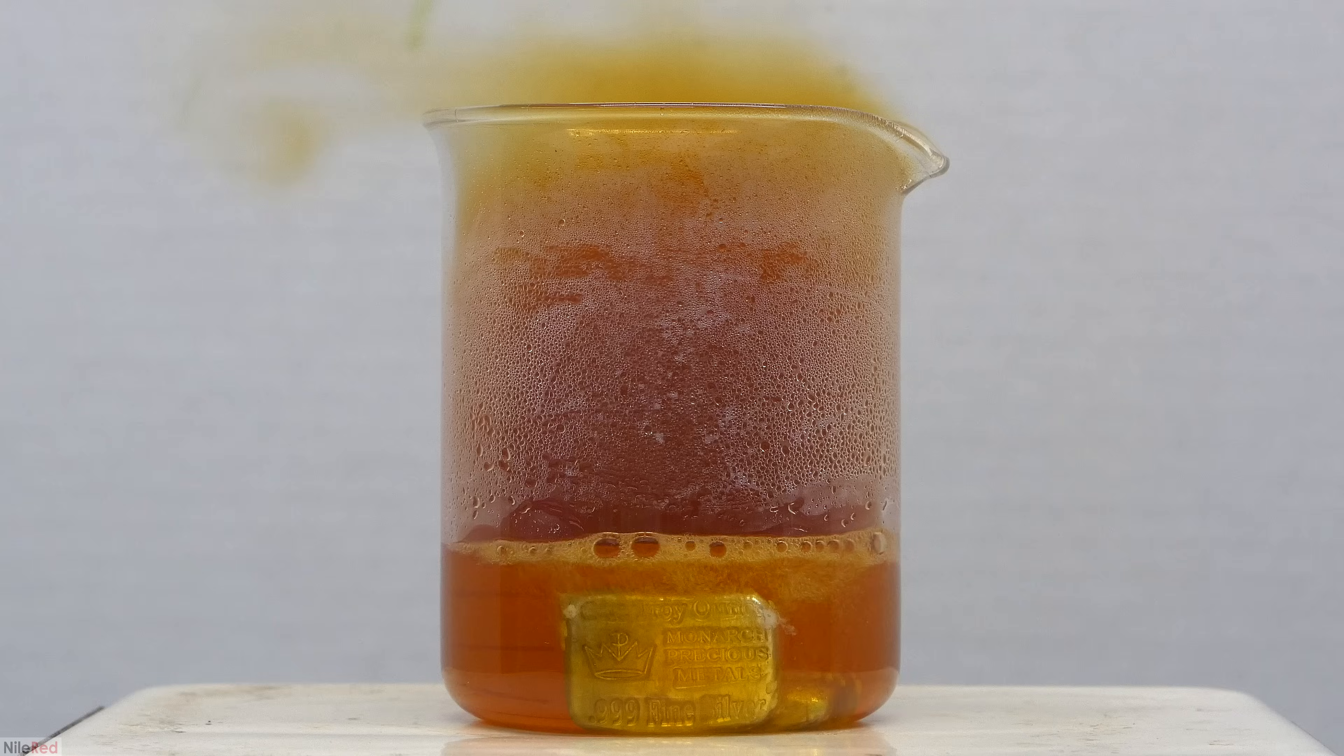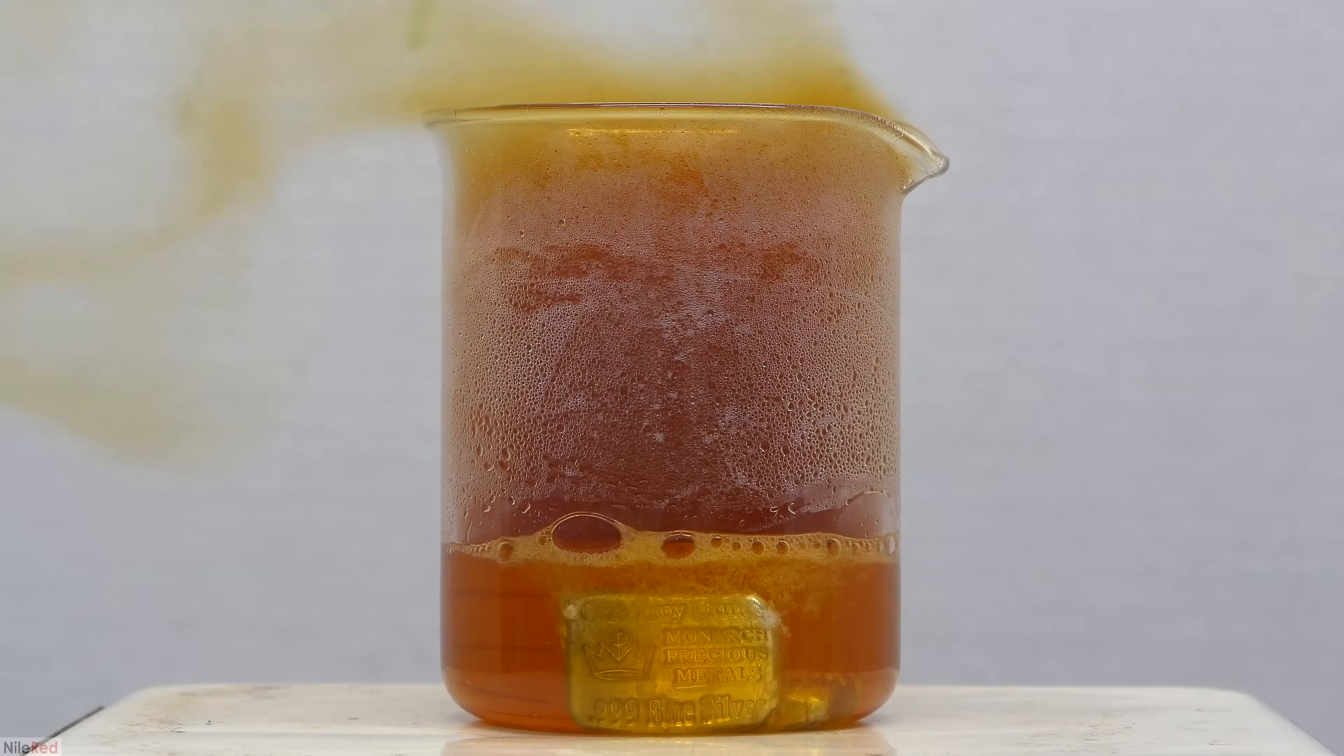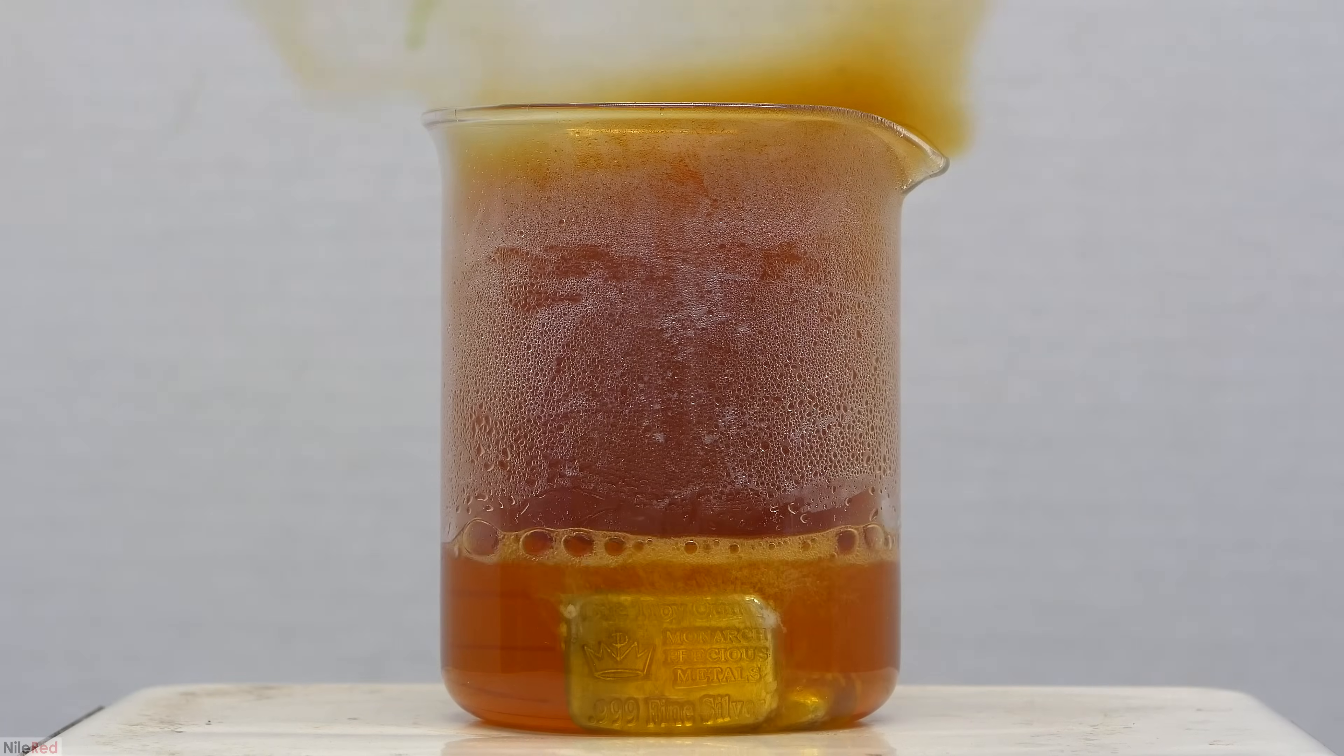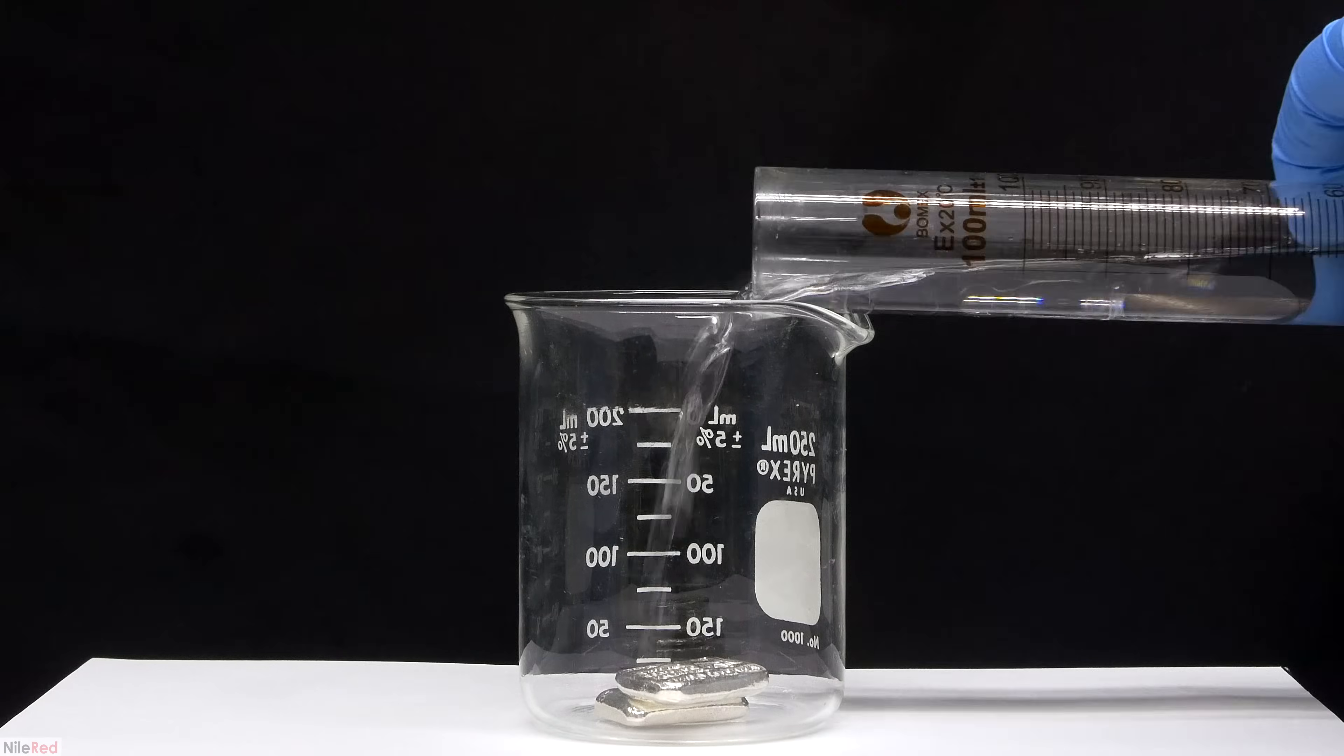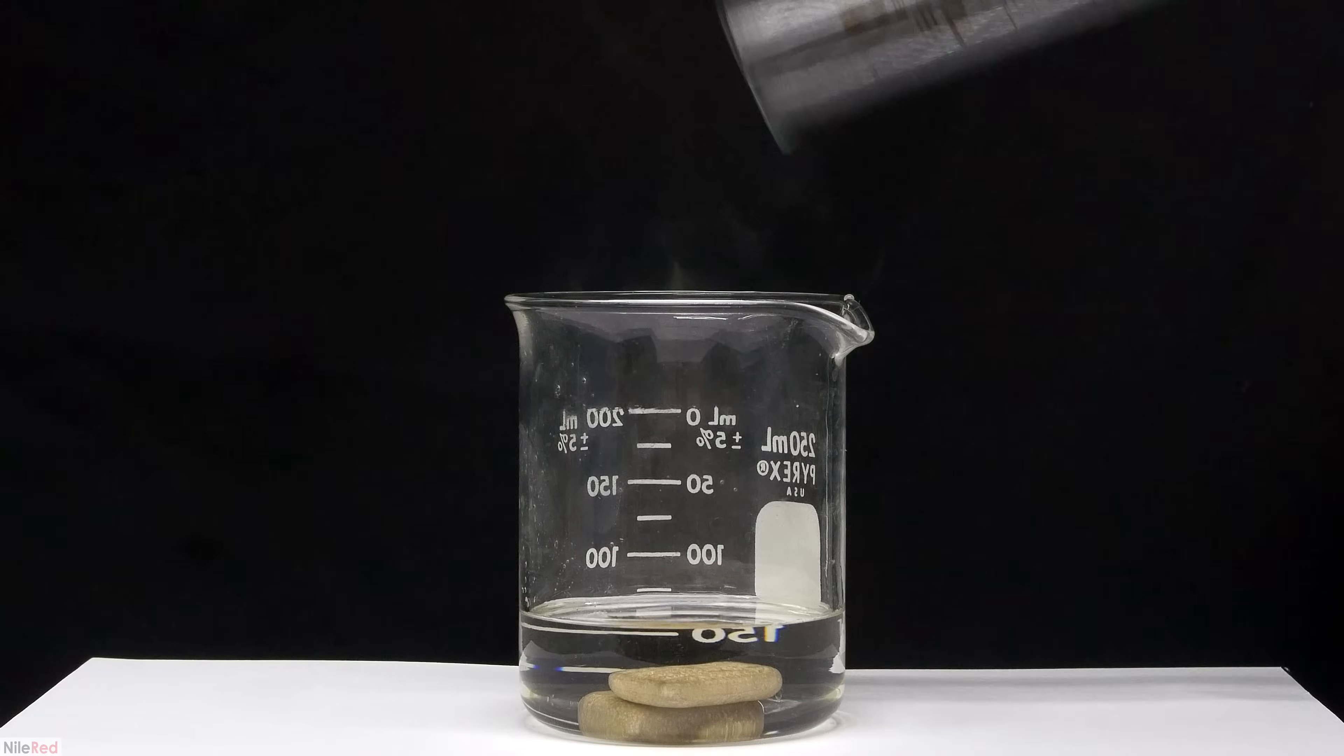Today we're making silver nitrate, which is a salt of silver metal. Silver nitrate has historically been used as an antiseptic and has a few uses in chemistry. I don't have plans to use it in a synthesis reaction, but I do want to carry out some demonstrations.